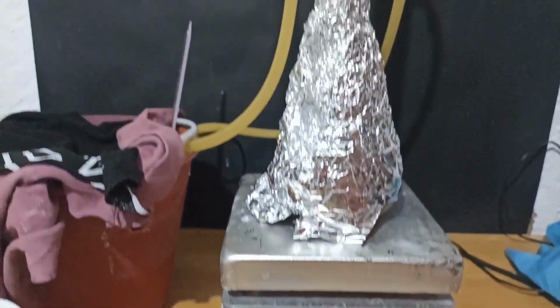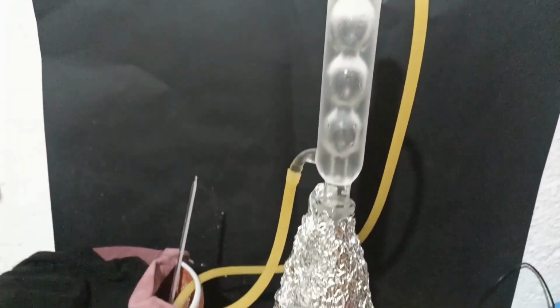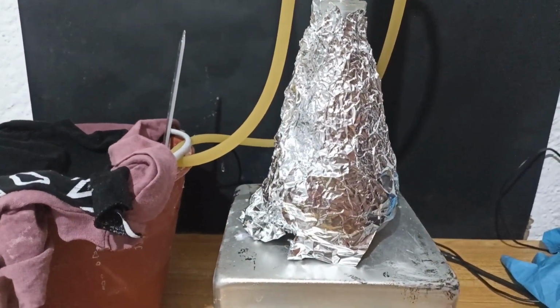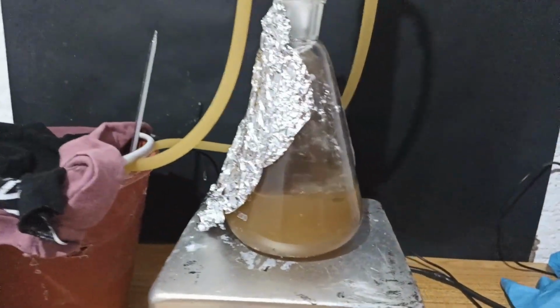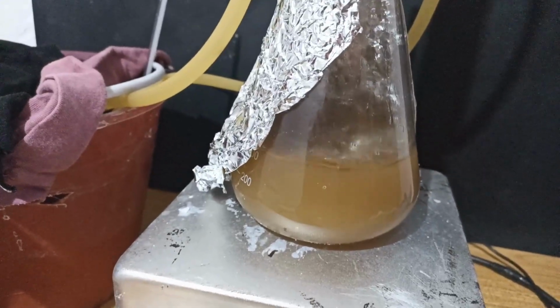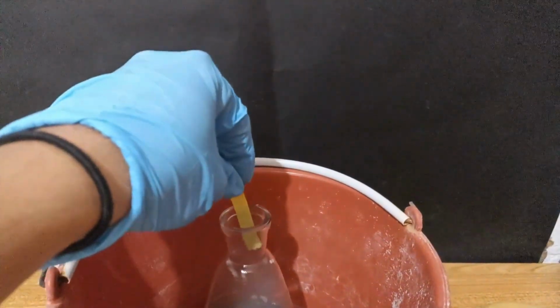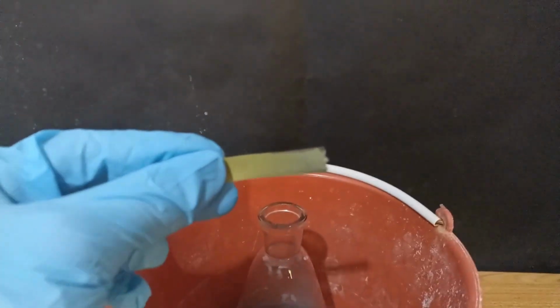350 milliliters of hydrochloric acid at 20% were added and the reaction was put into reflux for 14 hours. No HCl gas was released because it was azeotropic HCl. Cold water and ice were continuously added. After the reflux was over, sodium hydroxide was added until a pH of 13 was reached.